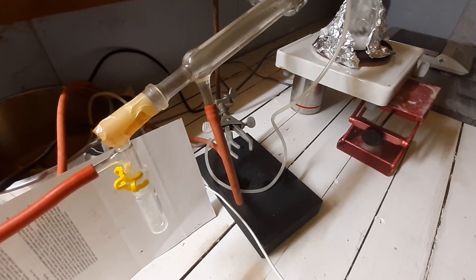So the bisulfate method might be more available to amateur chemists who might want to do this. You might want to use an old flask or Erlenmeyer in this case, because dry distillation is one sure way of breaking your glass. As soon as it hardens again, it tends to crack because of the expansion.